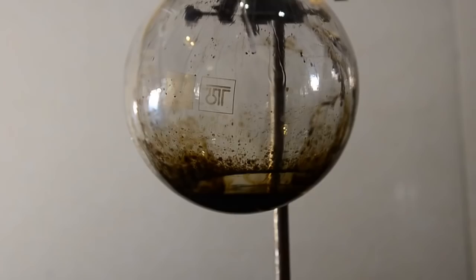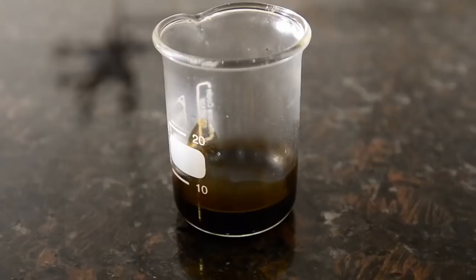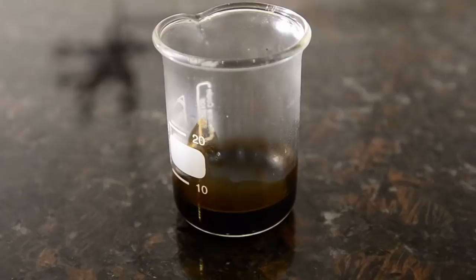The pot still contains a little bit of oil as you can see. We're not sure what caused the decomposition though. This has the same strong smell as the distillate, so perhaps some more product can be obtained from this.